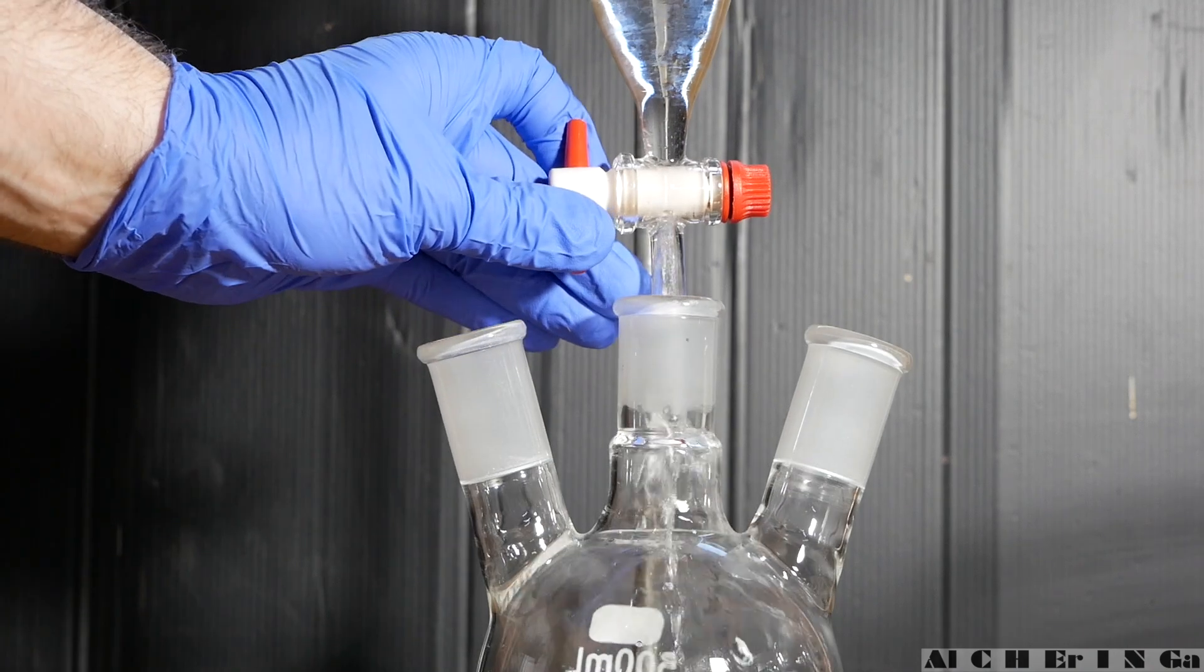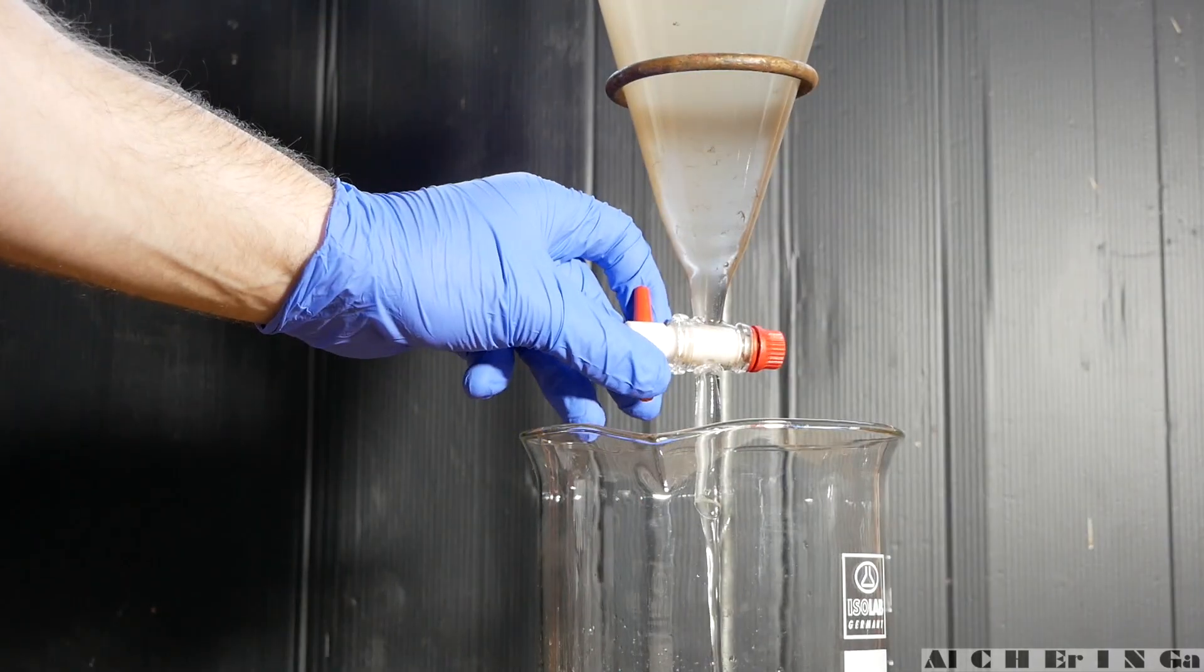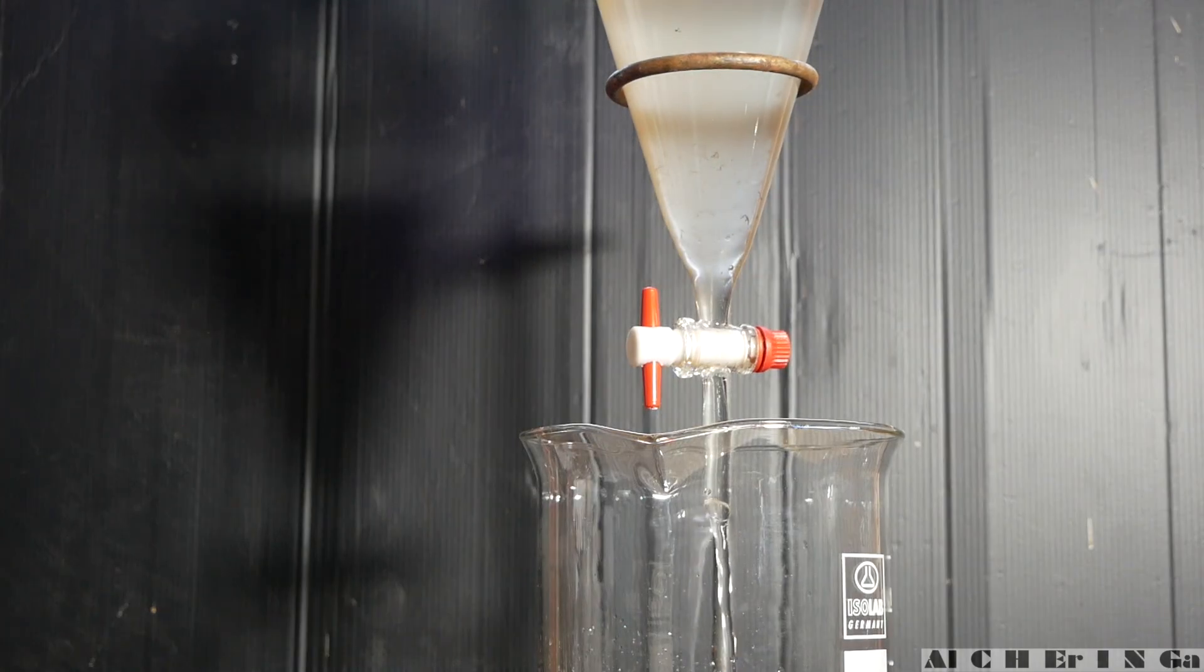Swirl the separatory funnel, vent and drain the bottom layer into a suitable flask. Drain the upper aqueous layer into a beaker. The first washing with dichloromethane is now complete.